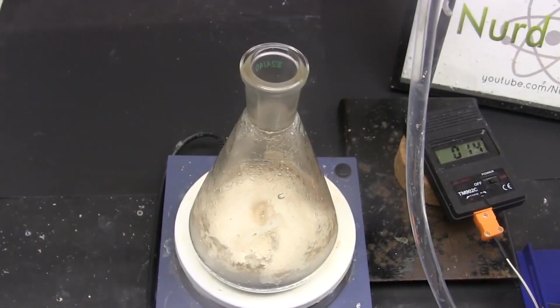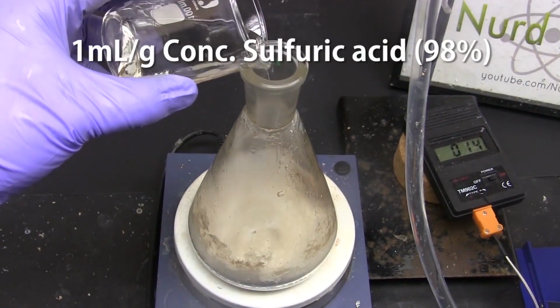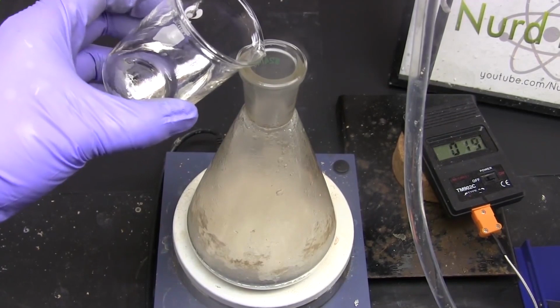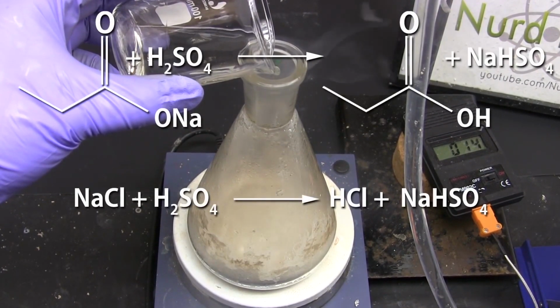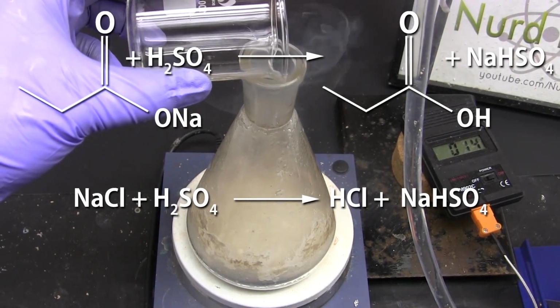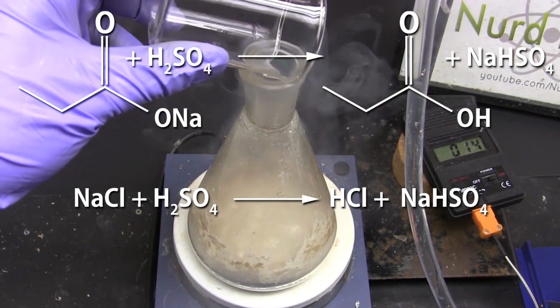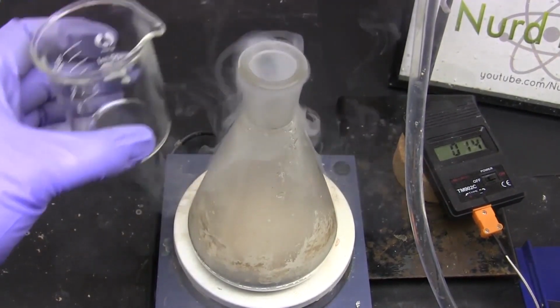Now we liberate our propionic acid by adding concentrated 98% sulfuric acid, about 1 milliliter for every gram. You can already see the fumes of propionic acid forming. Some of these fumes are also from hydrogen chloride, as inevitably there was some sodium chloride in the dry sodium propionate from small amounts of hydrochloric acid that was distilled over. As usual, this must be done outside or in a fume hood.